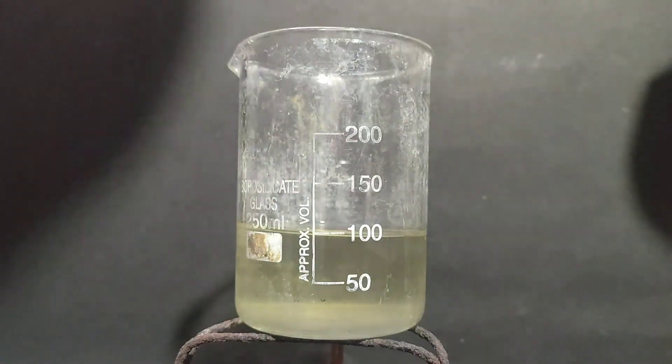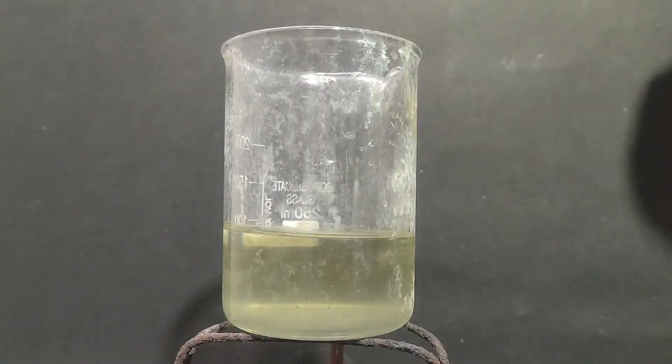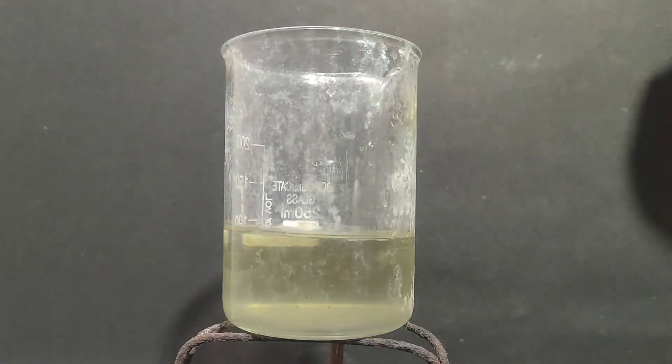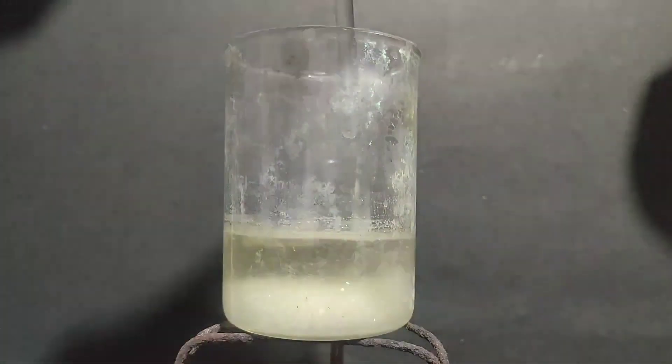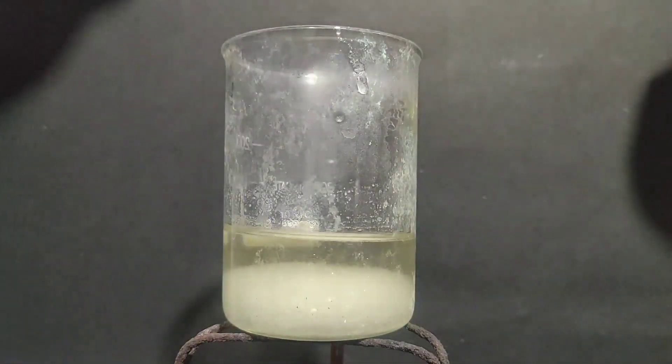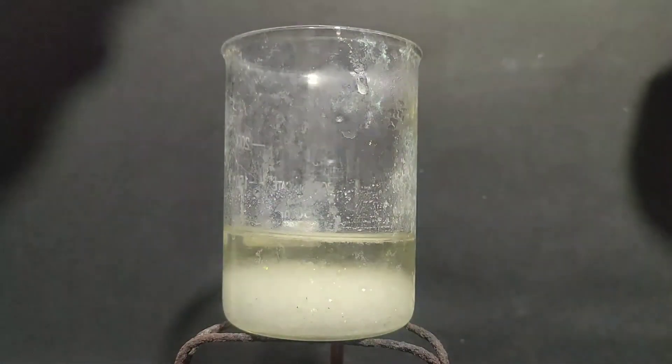Initially some crystals appeared on the surface of the solution. I took a glass rod and stirred the solution, and as I stirred, immediately the crystals precipitated.